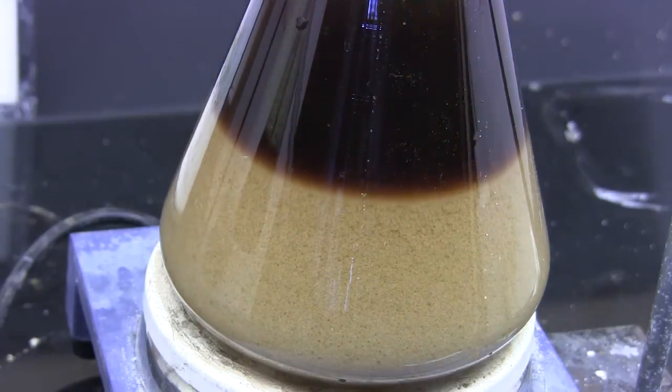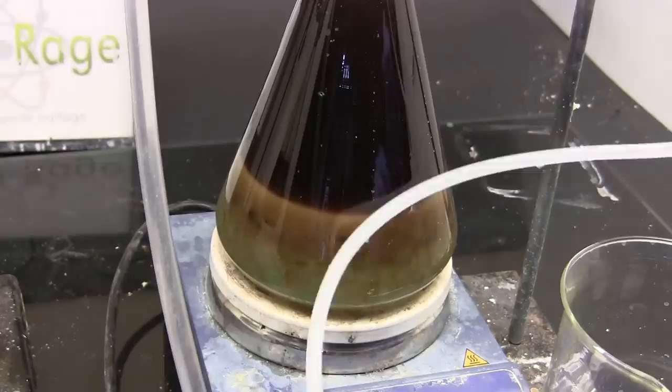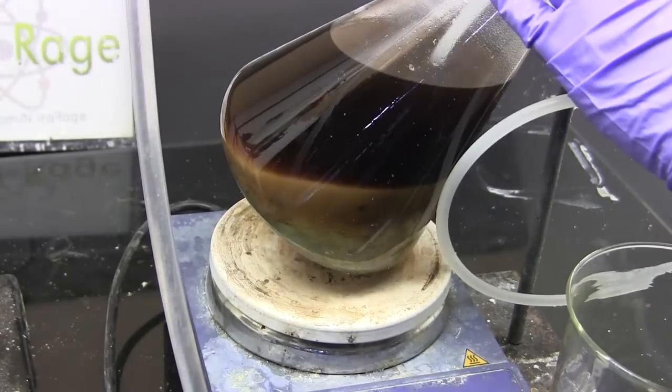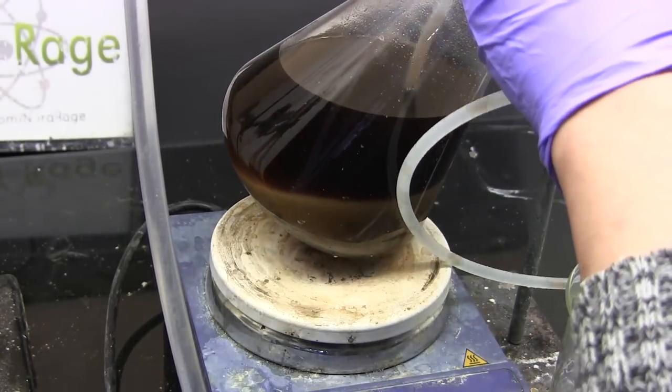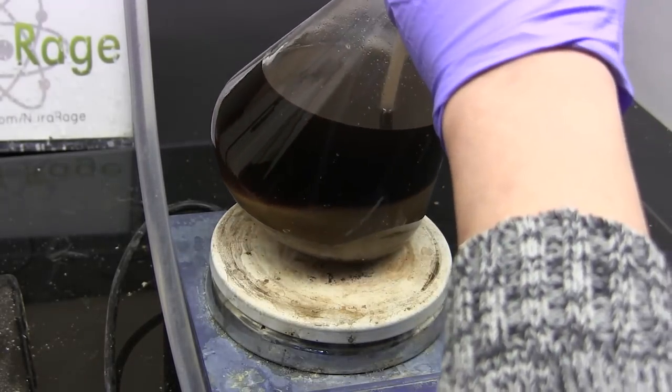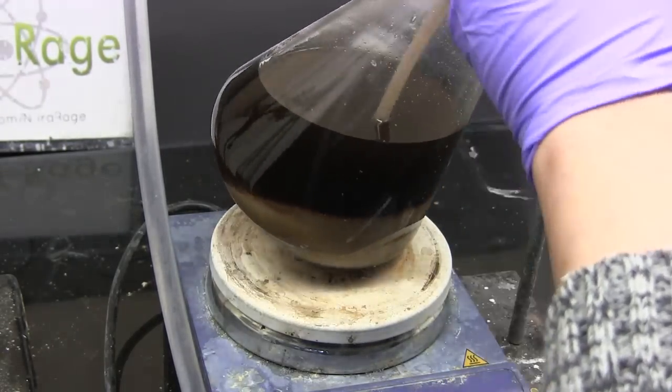Turn off the stirring and let the layers separate. Now we remove the lower aqueous layer. If you have a separatory funnel that can handle a liter of solution then use that. I don't so I'm just going to use a tube and siphon out the bottom layer.